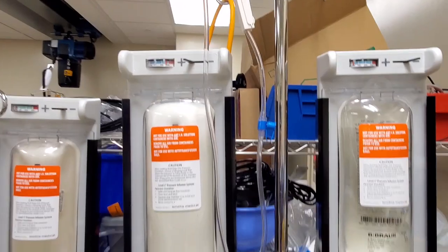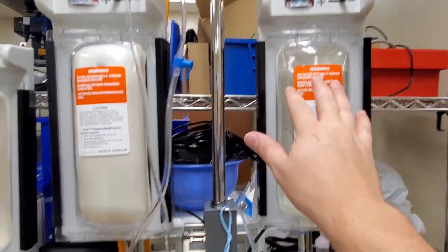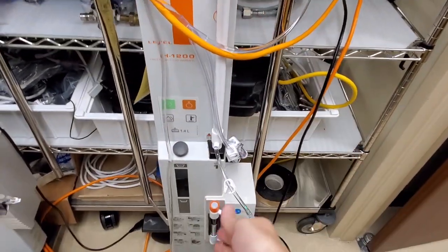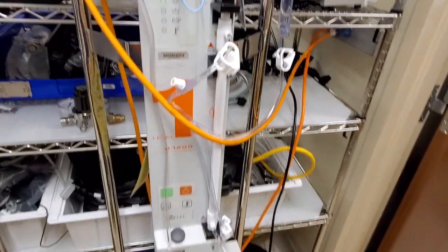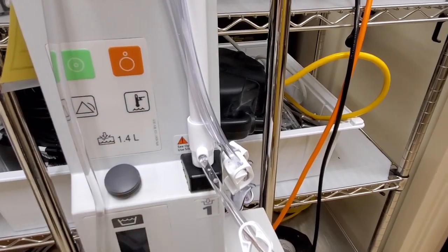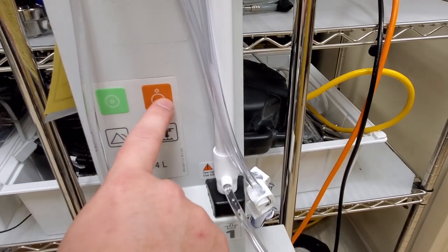So now that you know how and why it's used, you see I've got the two reservoirs on this guy. I currently have it set up. It's running at its normal operating temperature. It's 41 degrees C. You guys know that 37 degrees C is normal body temperature. Down here for the functionality you can test the over temperature. This is power. This is shut off.